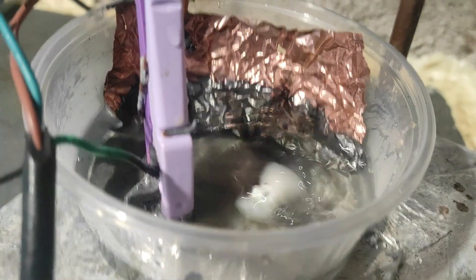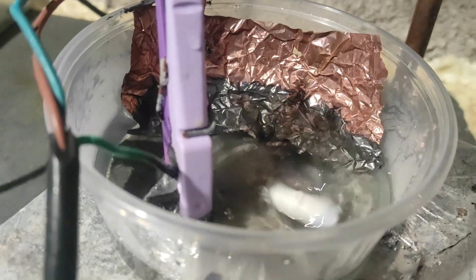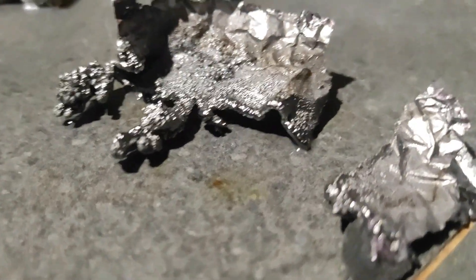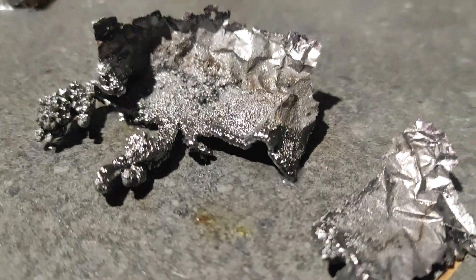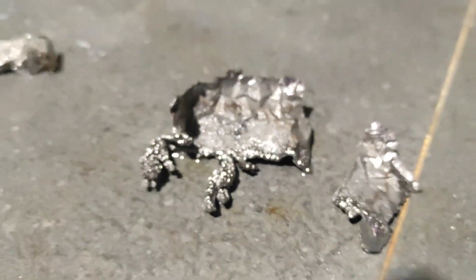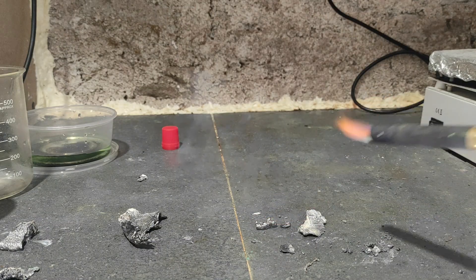So finally I tried again with a bigger copper sheet and less current according to the paper. I passed current through it for about 2 to 3 hours and this is the result — some weird dendrites but much more shiny and of a somewhat different form. I tested them with a blowtorch to see if they would detonate at least a little bit.